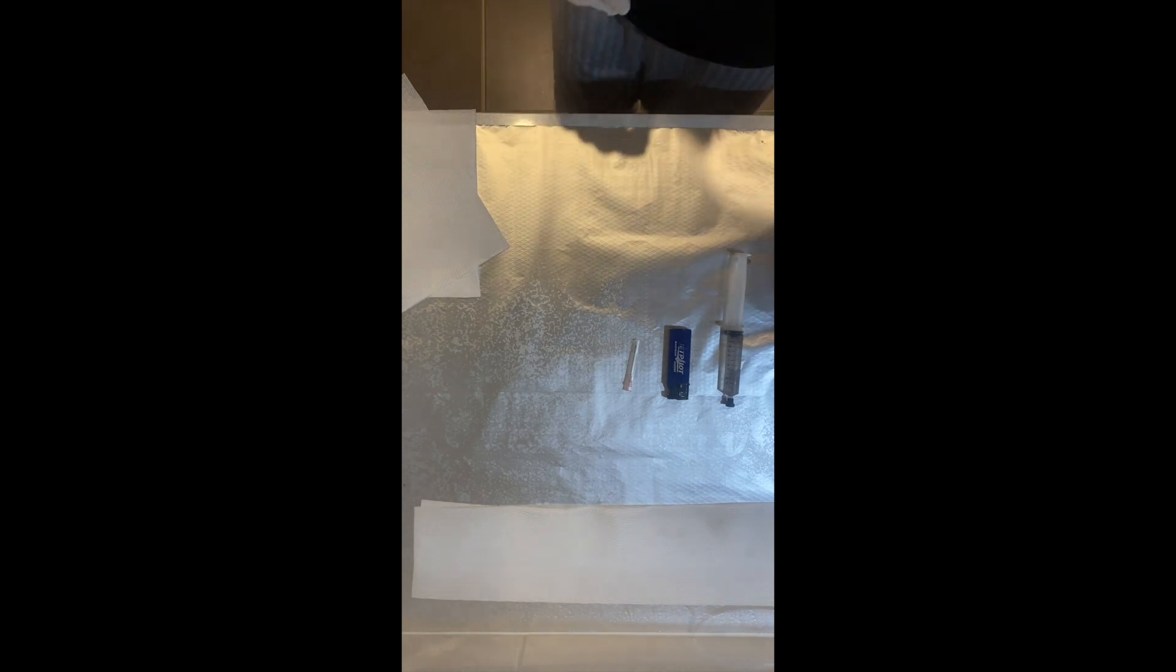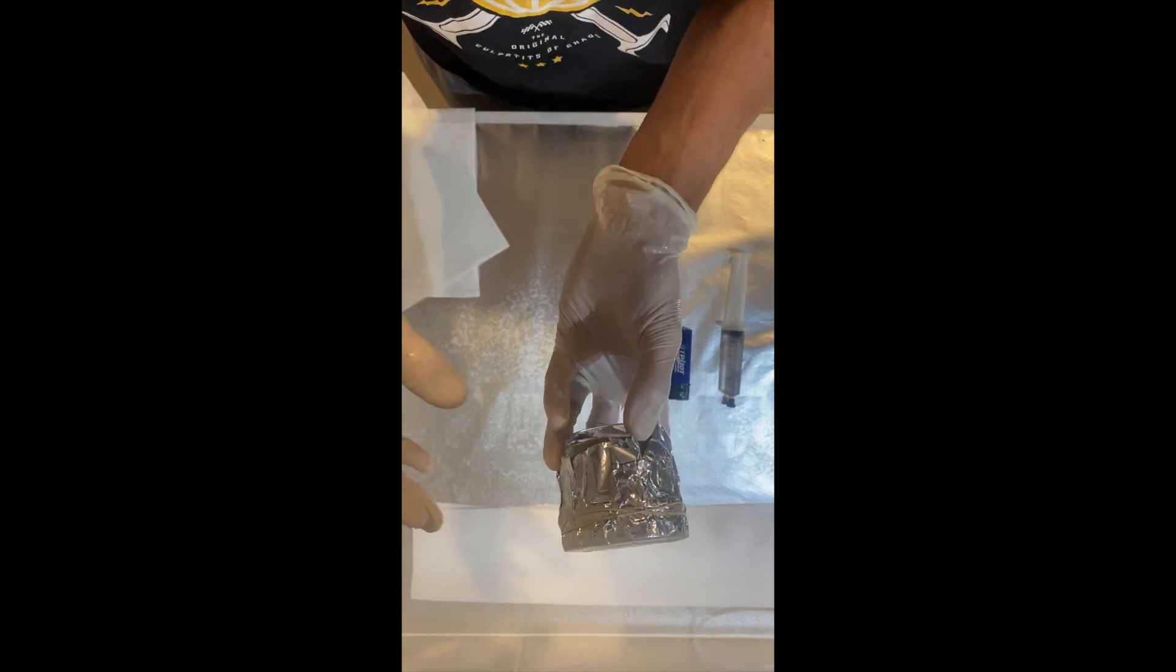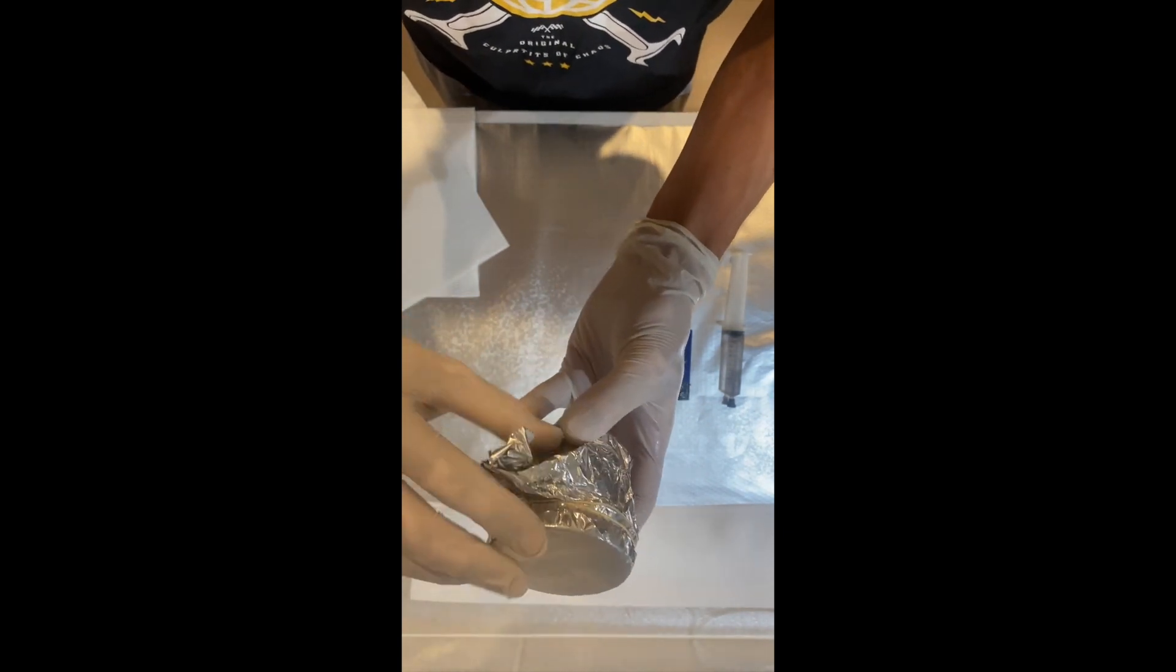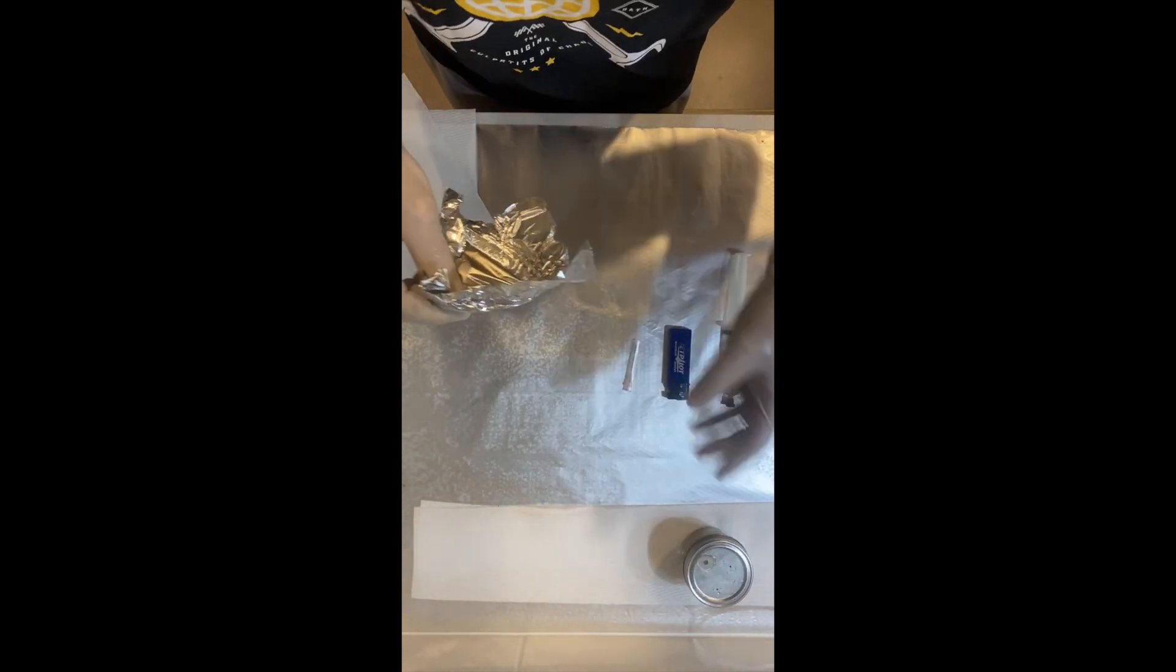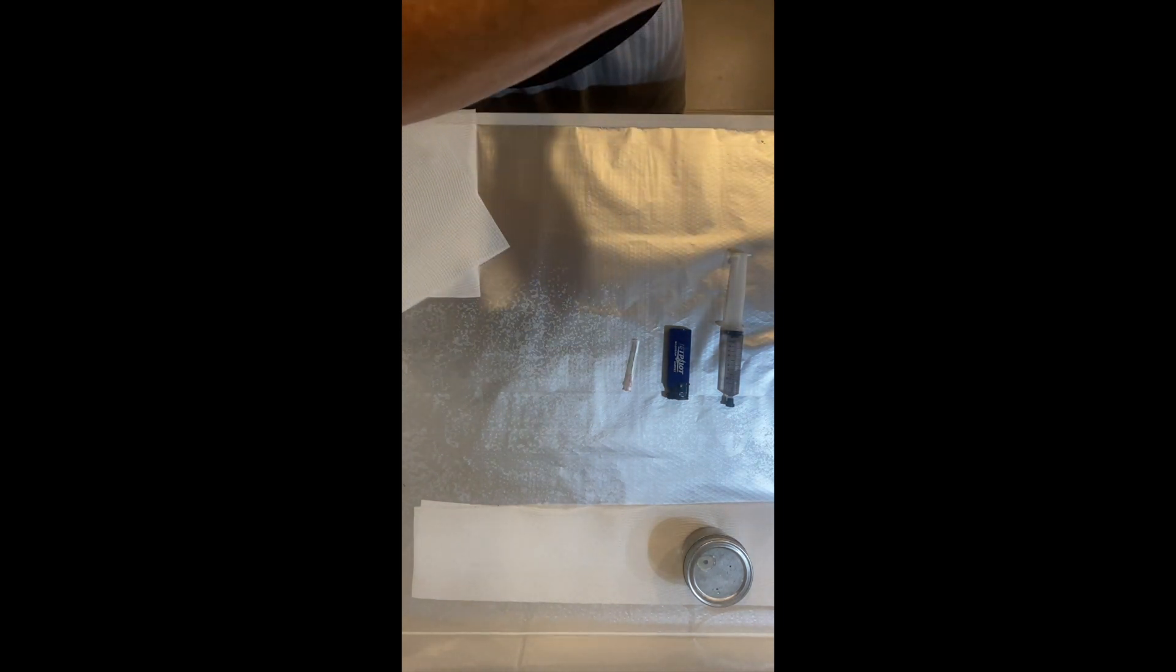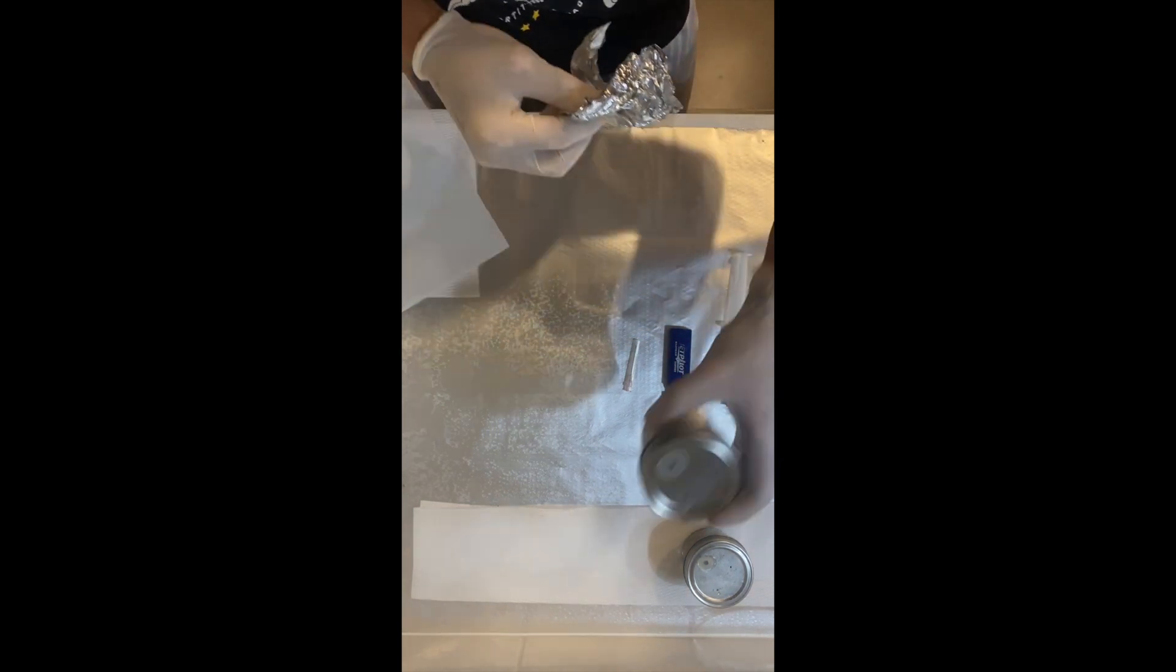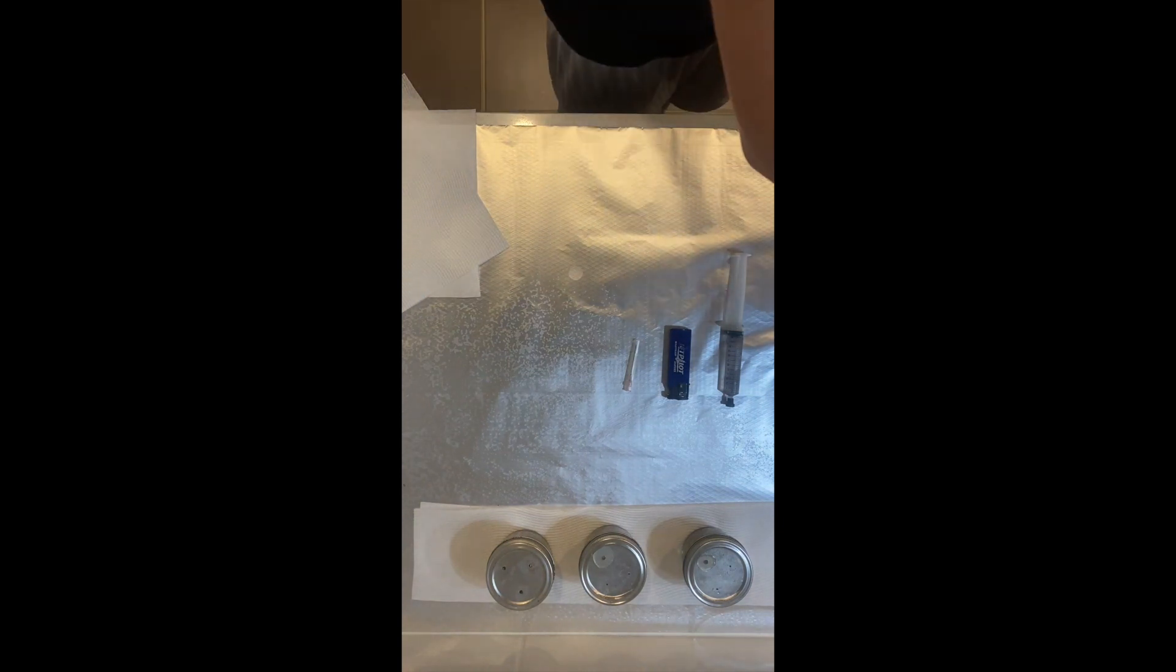Now we are going to get our jars from over here. You can see they've still got the foil. We're going to take that off and place each of them. I'll take the towel over here just because there might be a bit of residual moisture on the outside. You don't want to contaminate anything. Three and four.